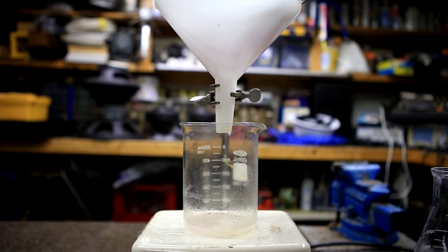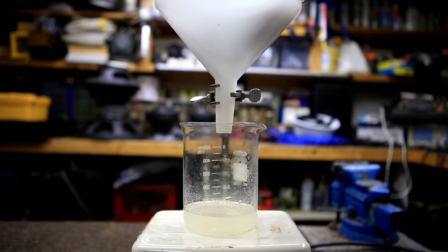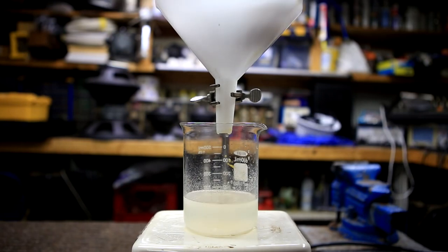One thing you'll probably notice is that the pink color actually disappears as the solution is filtered through. To be perfectly honest I'm not entirely sure why this occurs but this is related to the oxidation state of manganese ions which doesn't represent the reaction. The insoluble material was washed twice with a small amount of water, only 25 milliliters.